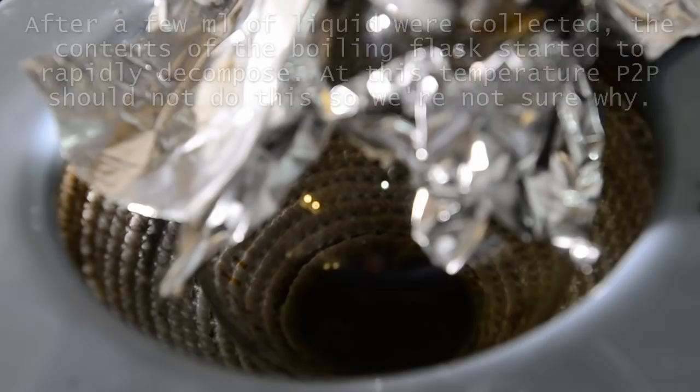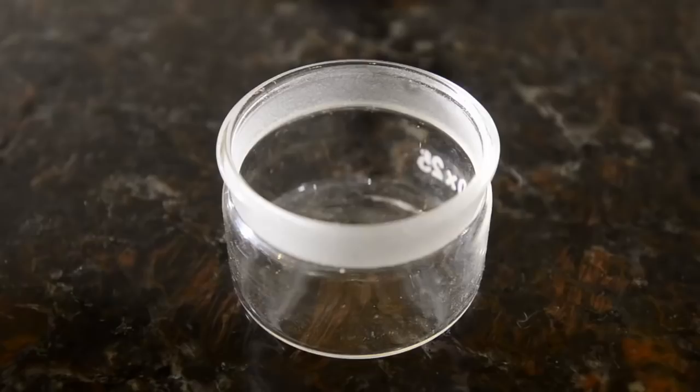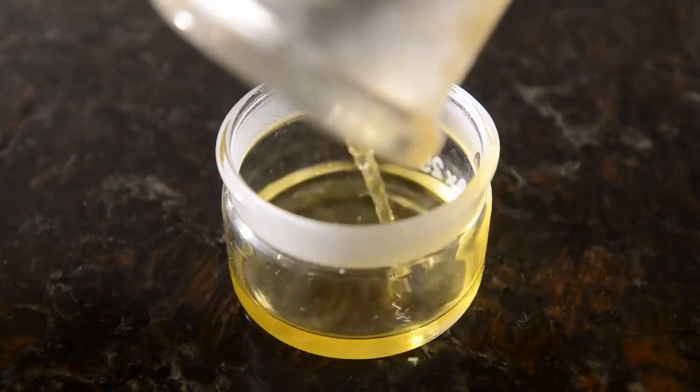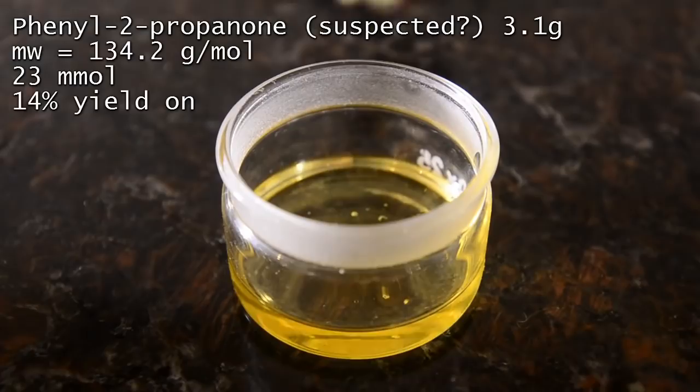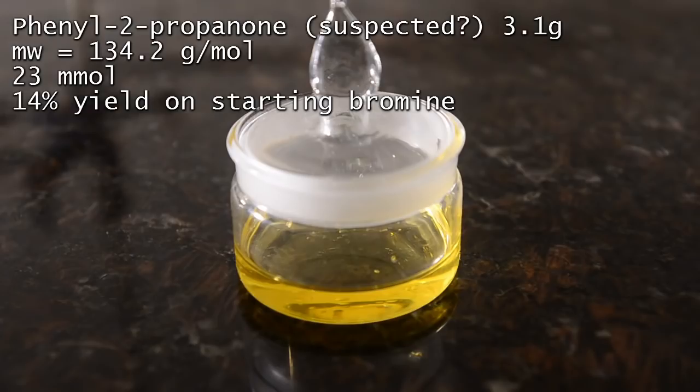We got 3.1 grams of the yellow oil with a very interesting aroma. Sweet and somewhat similar to propiophenone, but without the spiciness and with a slightly more pine needle and Christmas tree overtone. If this is phenylacetone then it's a 14% yield from bromine, the limiting reagent in the reaction. This isn't great, but actually we're quite surprised that we got anything from this.